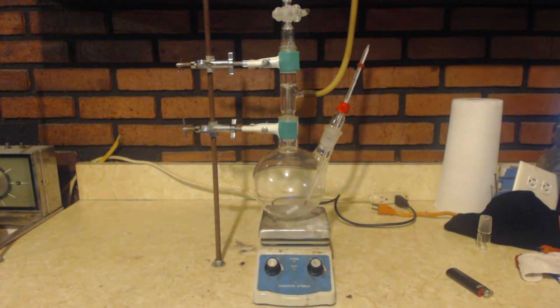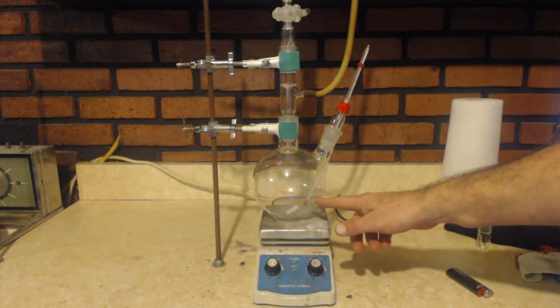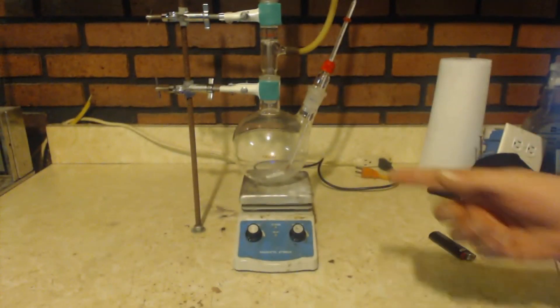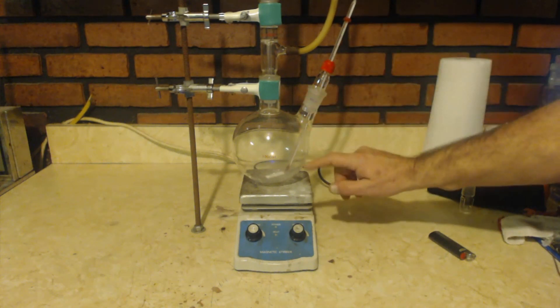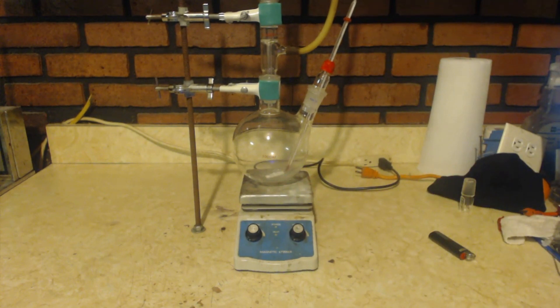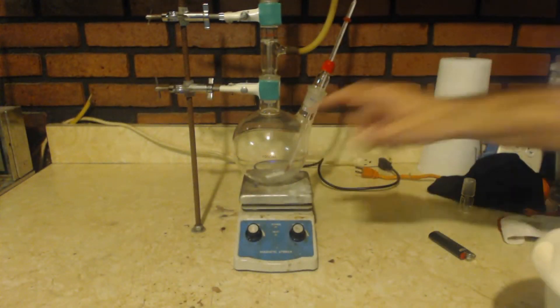I'm going to try to make some nitroethane. I'm going to show you my apparatus first. I'm going to put silver nitrite in here with some diethyl ether. You can see I've got the stir bar on there. Then I will drip in some ethyl bromide that is mixed with some diethyl ether solvent. Right here I've got the thermometer so I can keep my temp low. I'm going to have an ice bath right here to keep this nice and cold.